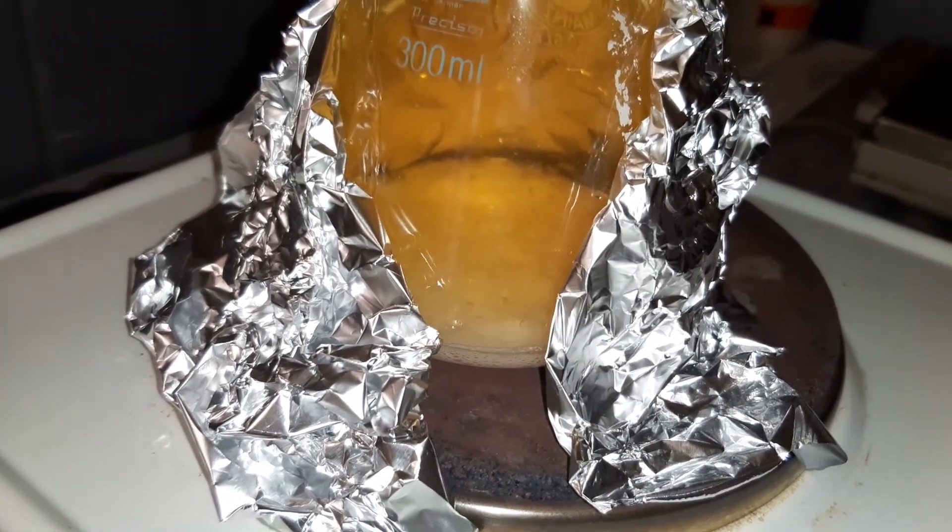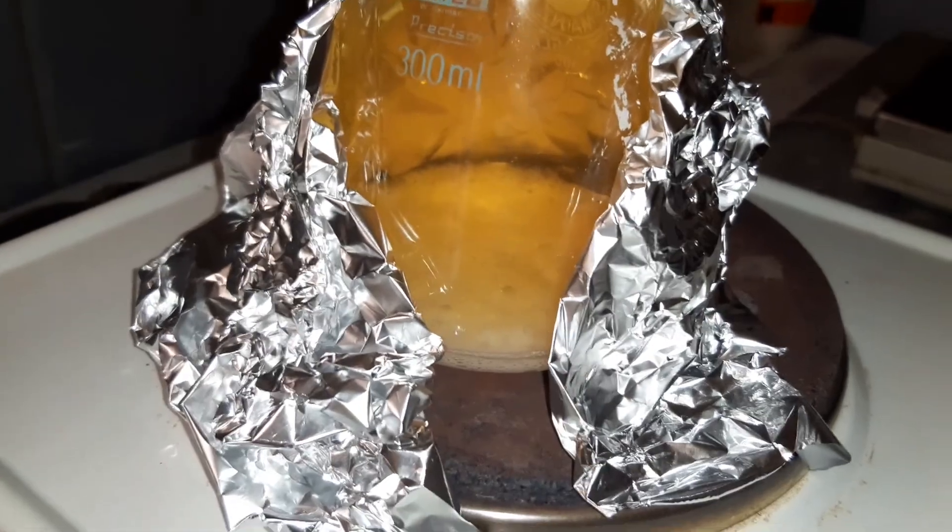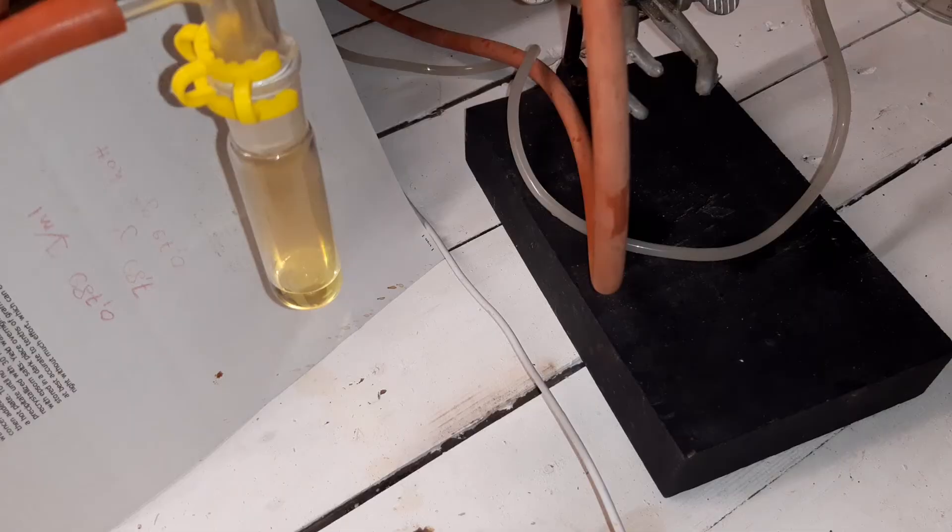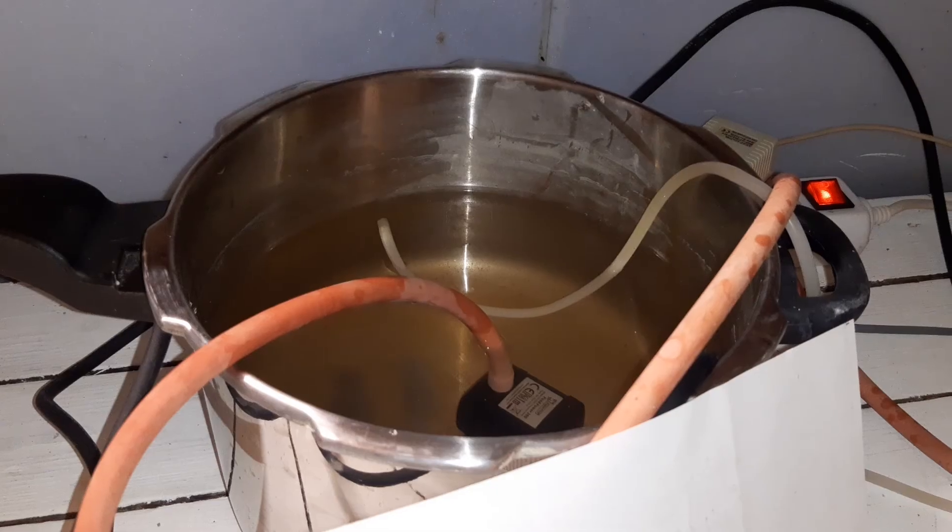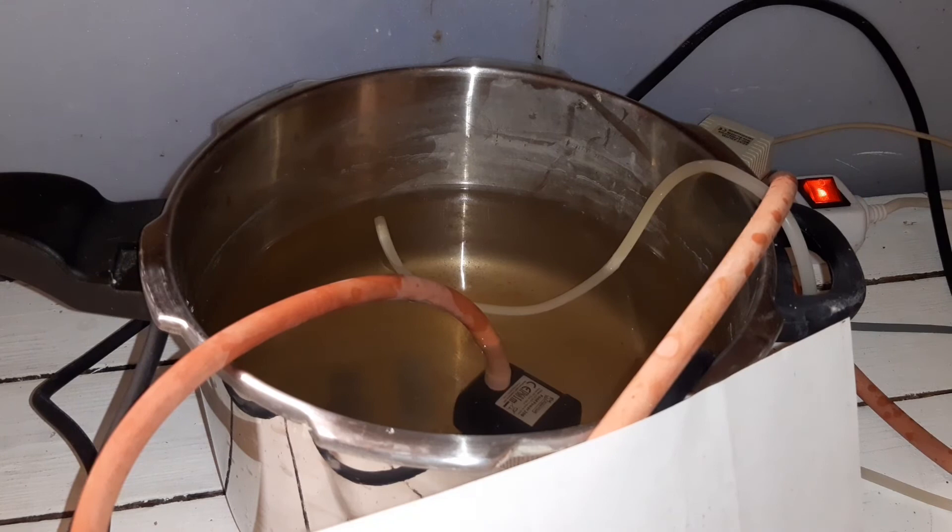The distillation is starting to slow down. I'm gonna turn down the heat. All right, so it's time to weigh the product. I just wanted to show you my new pump—I recently bought this tiny little pump online for a couple bucks.